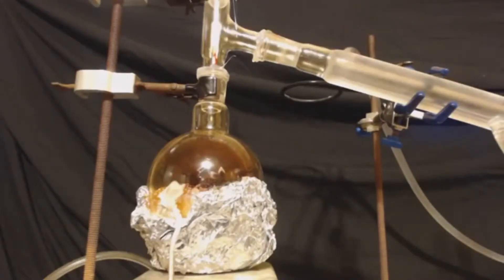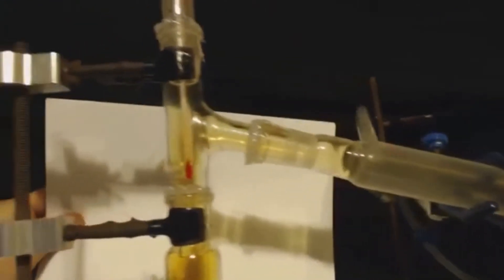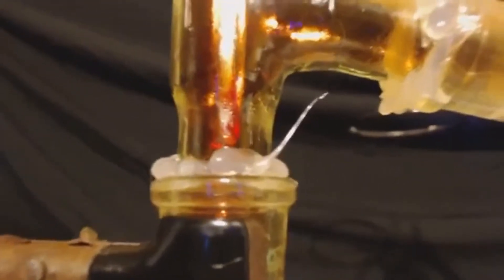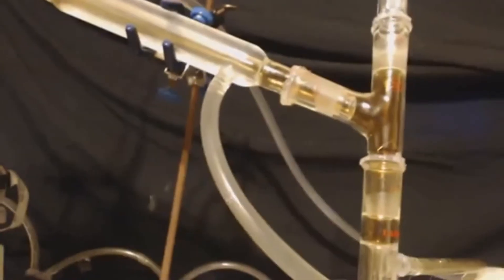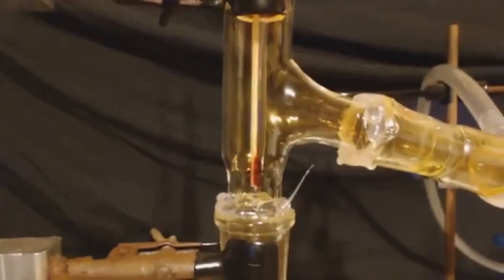Distillation is starting — it's starting to boil now. You will get some nitrogen oxides like nitrogen dioxide, as you can see. Usually once you start distilling, a few minutes in it should subside. As you can see it starts to clear up after distilling begins. Here's a before shot because it's all filled up — look at that, even over by the receiving flask it's just filled with gas. Now you can see it starting to lighten up — that's just the beginning of the distillation.